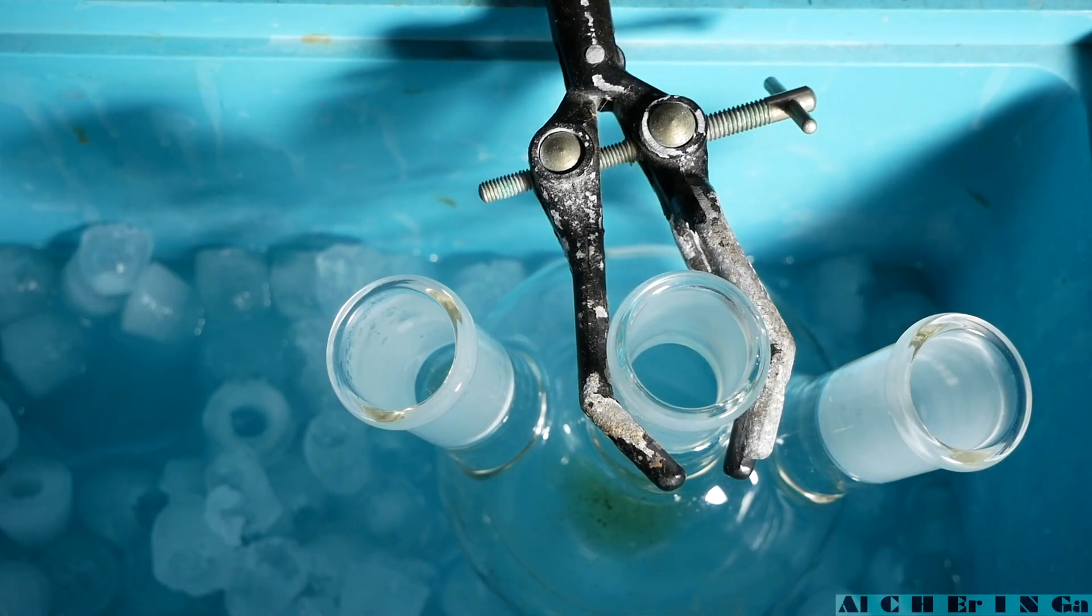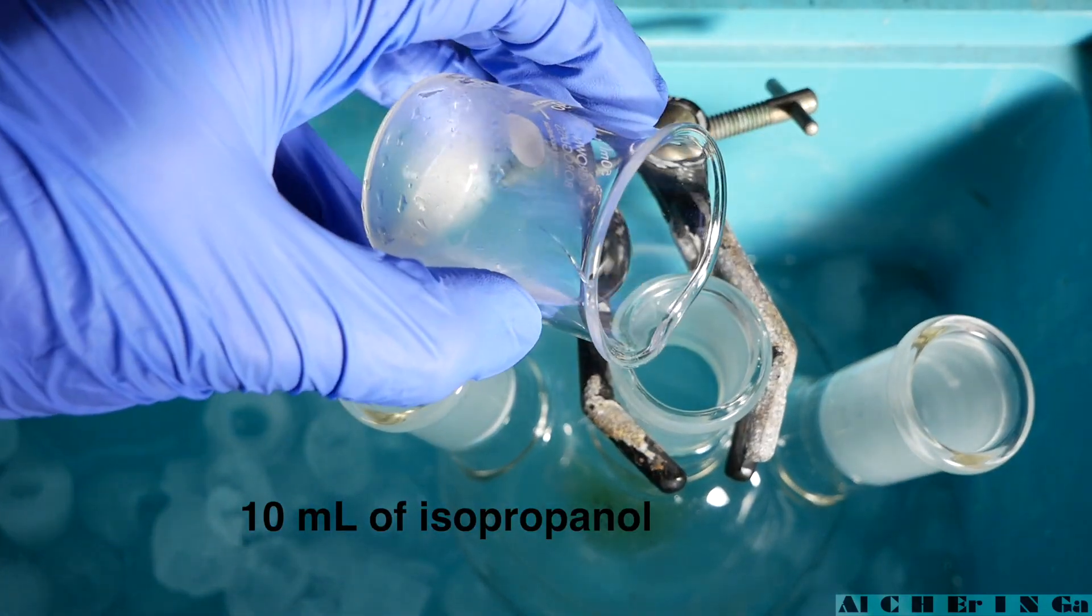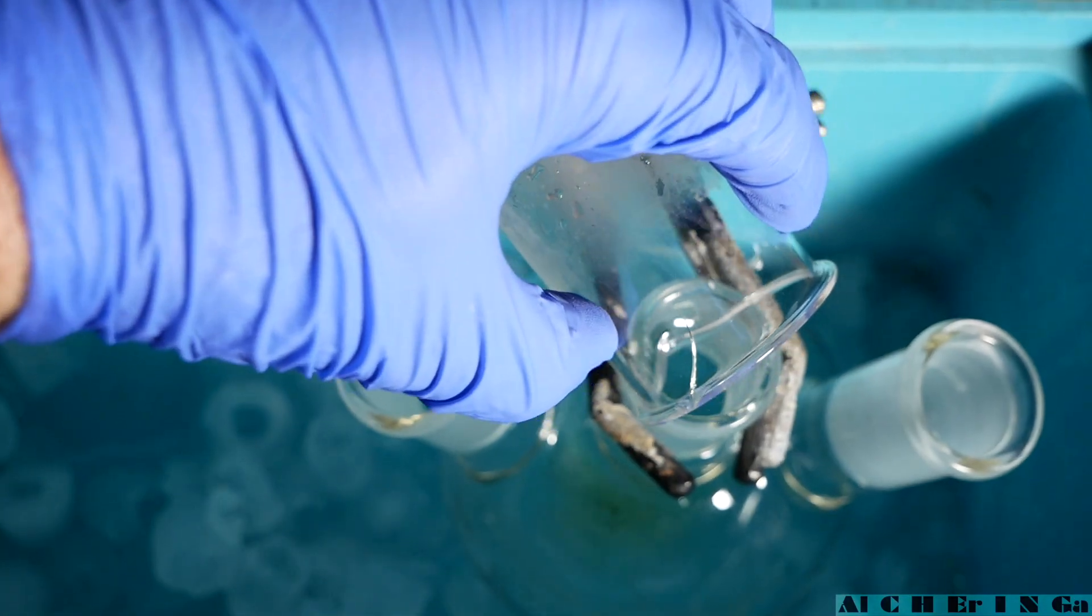Okay now, cool the free base in an ice bath and add cooled 10 milliliters of isopropanol. Mix thoroughly.